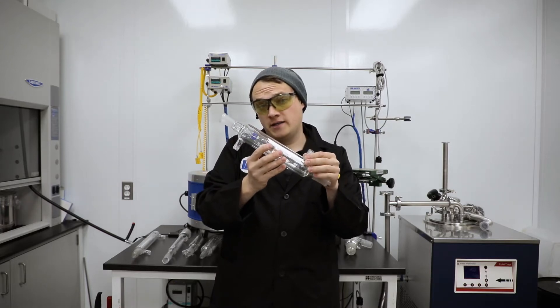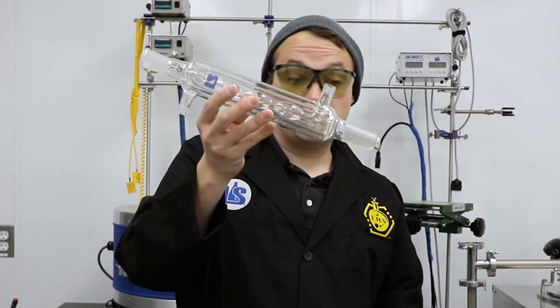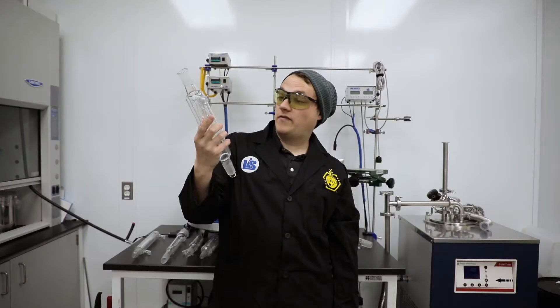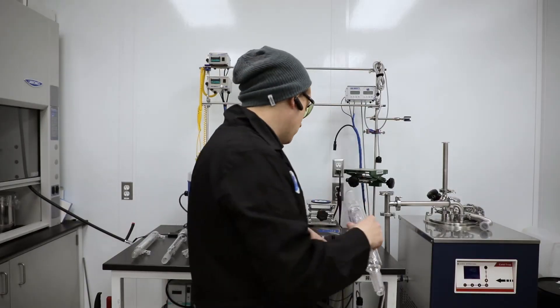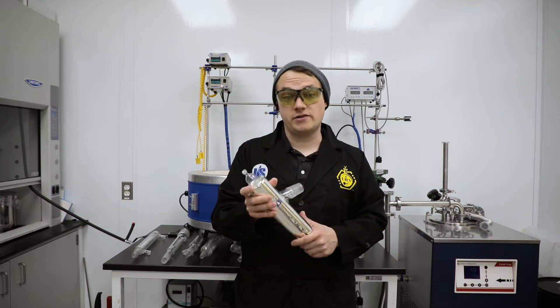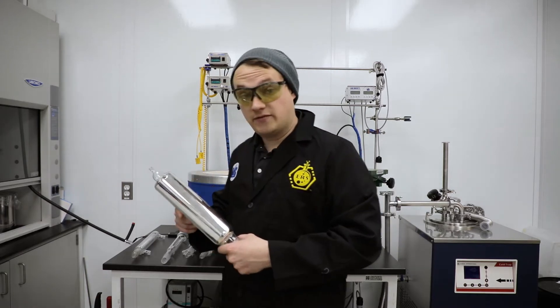What's cool about these is that they increase the surface area via the bubbles but they don't impede flow, so it's not going to cause a whole lot of clogging as there's still quite a bit of space for the material to flow through. These work especially well for hot condenser tech because you can heat up the outside and the inner to get extreme surface area and separation surface area. They also work very well for terpene capture if you're running super cold. All of our distillation heads have detachable condensers for this purpose — we like to make our systems modular so that you as the operator can choose how you want to run and what you want to condense.